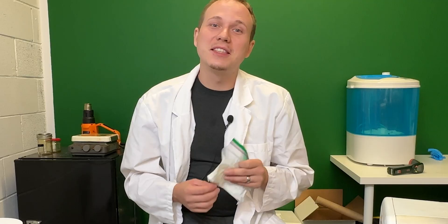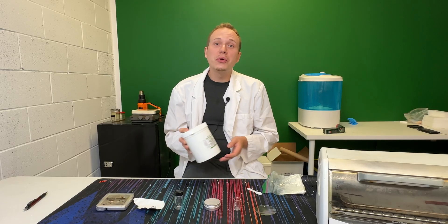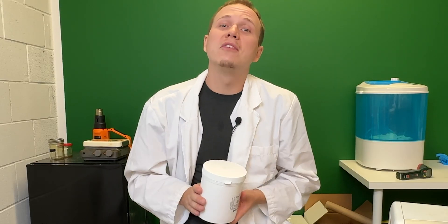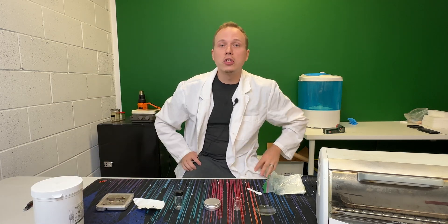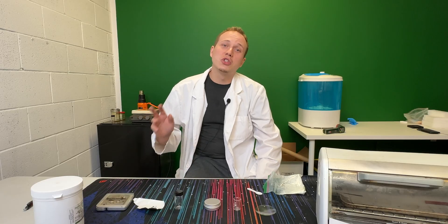In some countries, it's a lot easier to get CBD than it is to find THC. So in this video, I'm going to show you how to mix CBD with Zeolite to create THC. With this easy mixture, all you have to do is mix them together, put them in the oven, and you'll have an edible product. Please note that this is not a vapable or smokeable product. The Zeolite is not smokeable, but it is able to be consumed orally. You can eat it, and some say it's good for you. It's debatable how good it is for you, but it's definitely not bad. So this is a great way that you can get some THC into your system if only CBD is legal in your country. Now let's check it out — I'll show you how easy it is to do.